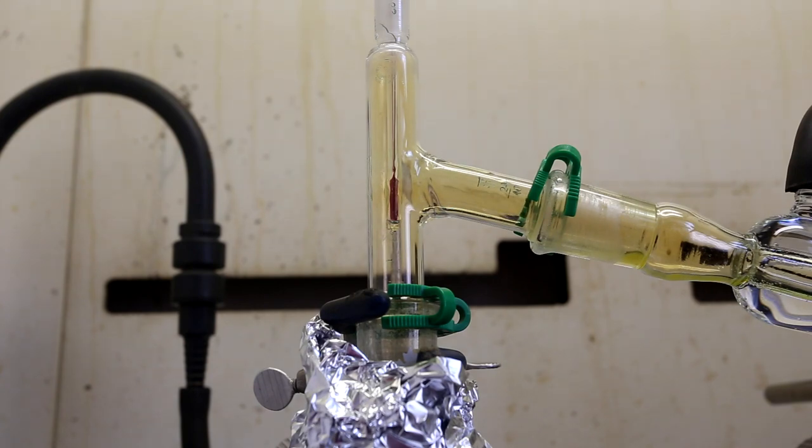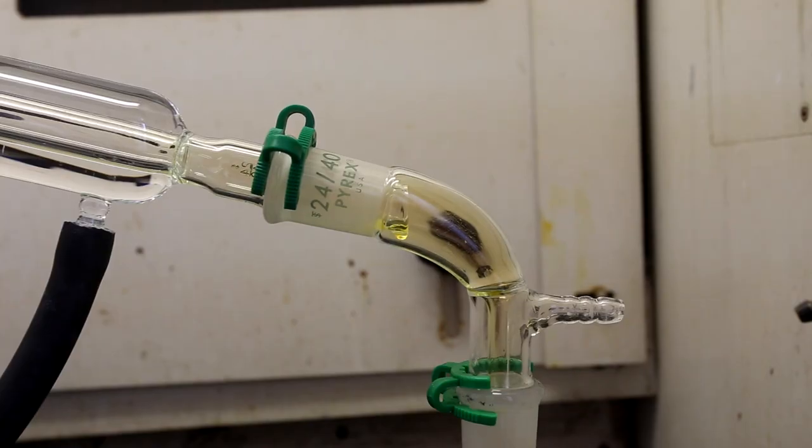When it first starts coming over, it might have a brown color like this. The brown gas is nitrogen dioxide gas and it taints the distillate a little so the distillate comes over as a yellow color. Good control of the temperature and keeping the temperature at or below 83 degrees Celsius will limit the amount of nitrogen dioxide gas that is produced. The nitrogen dioxide gas is mostly formed by decomposition of the nitric acid due to excessive heating.